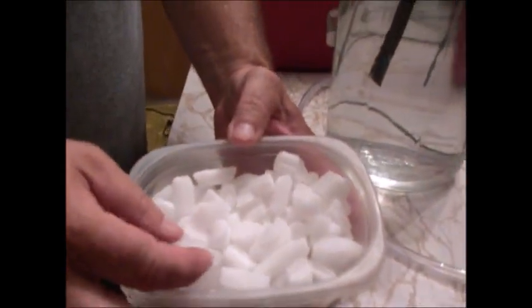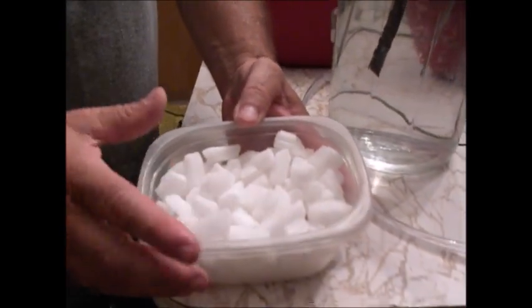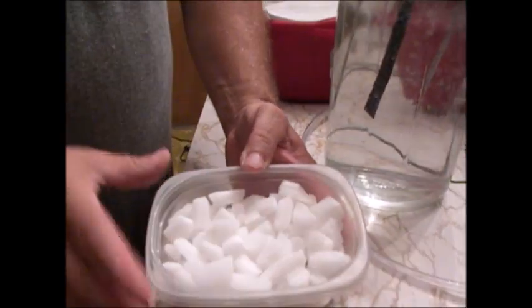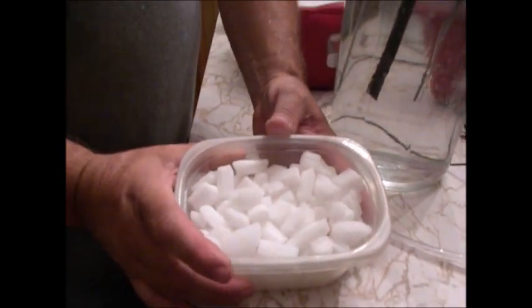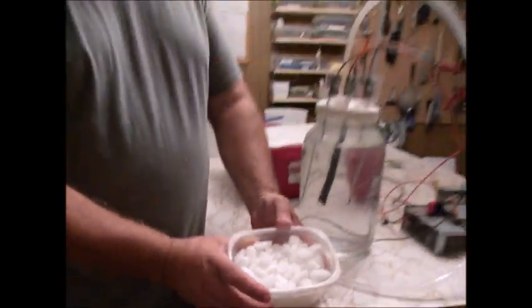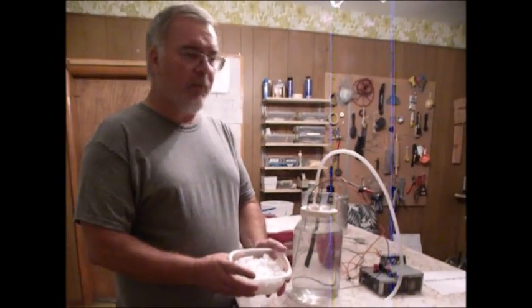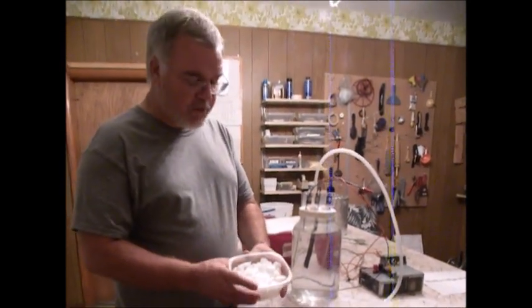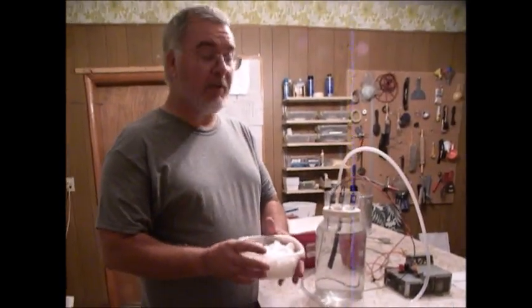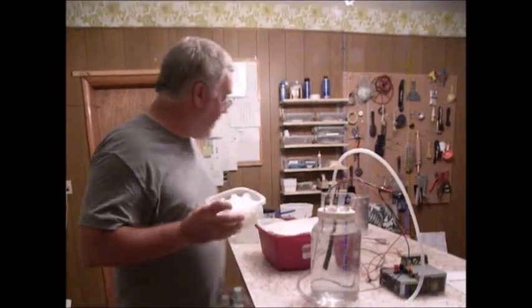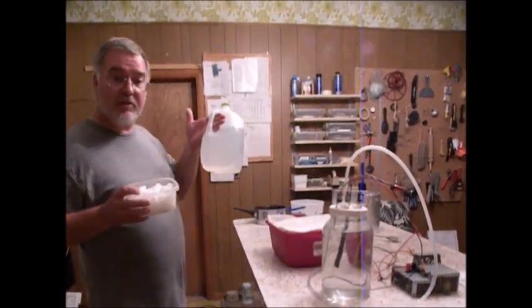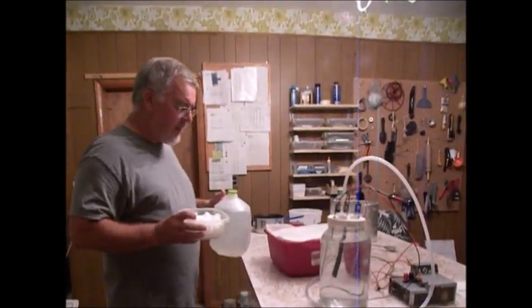We use potassium chloride. It's a primary ingredient in many ice melts that we use in the wintertime. I get this in - well, you can get it in a lot of hardware stores. I got this in a 50-pound bag. You could probably get it in smaller versions, but 50 pounds is going to produce an awful lot of chlorate. Only other thing we need is distilled water.